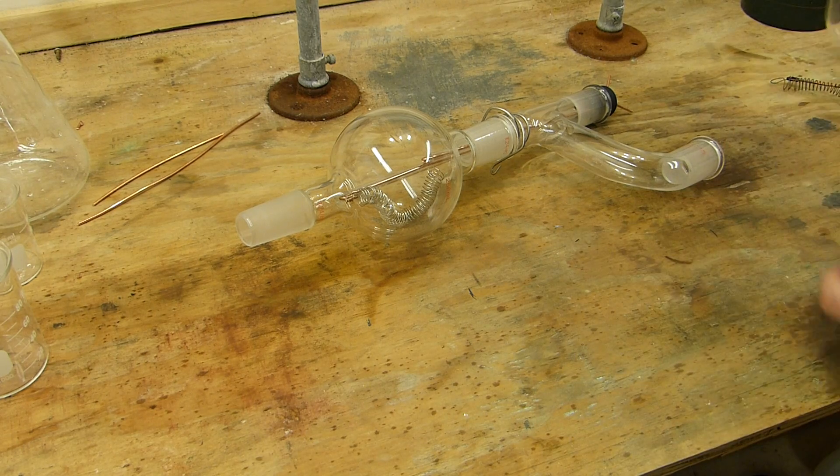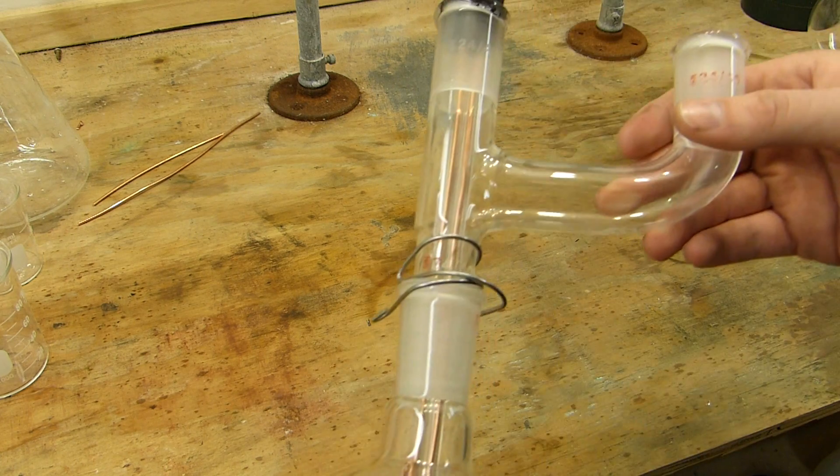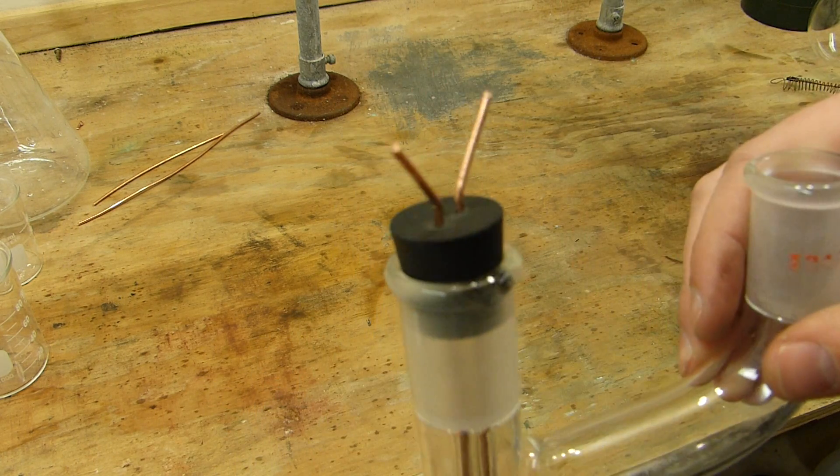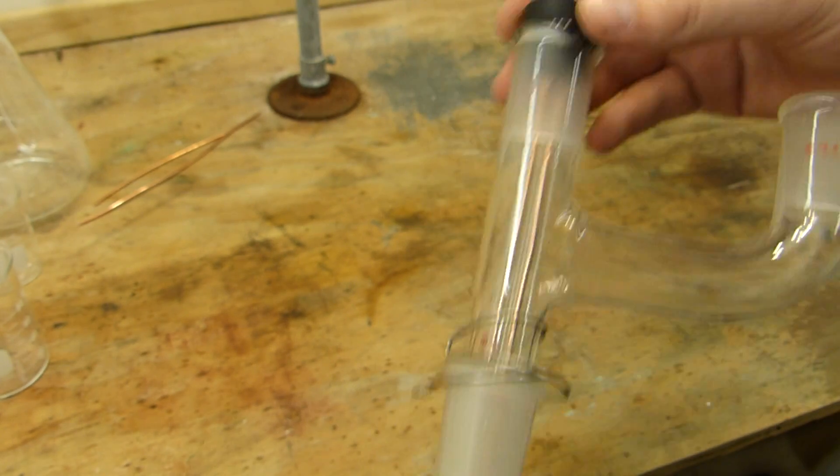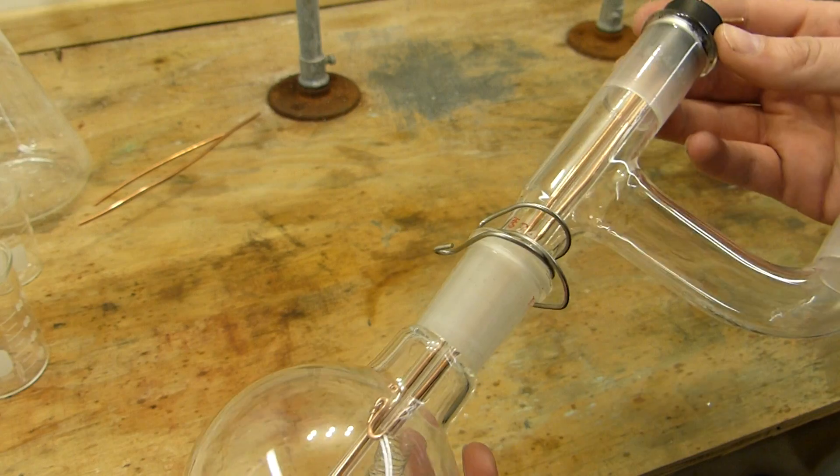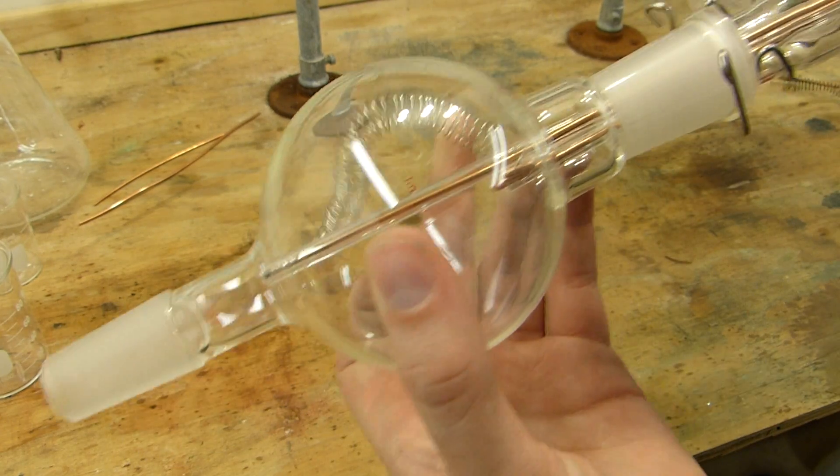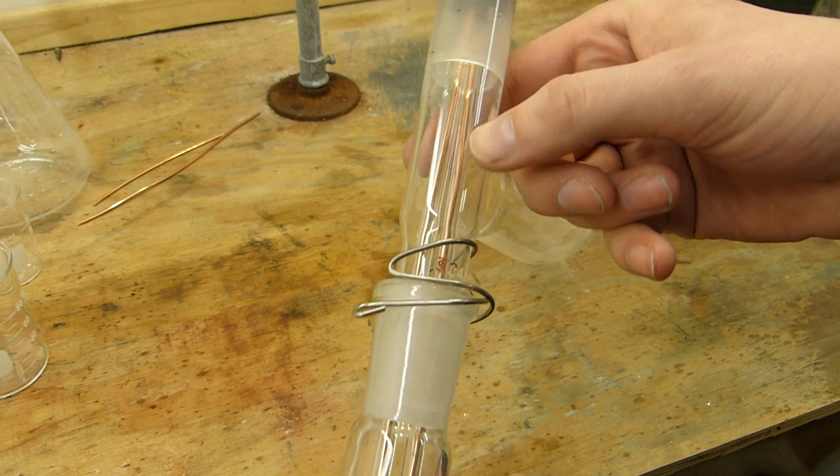So, I've come up with Mark II. I have videoed pretty much all the construction of this. This is the new ketene lamp apparatus. You can see, same style except we have a better seal here on the stopper. And the filament itself is much farther away from the stopper, which is going to keep it nice and cool and keep that connection solid. I also have more nichrome on that. And then the insulation on these copper wires is just glass tubing.